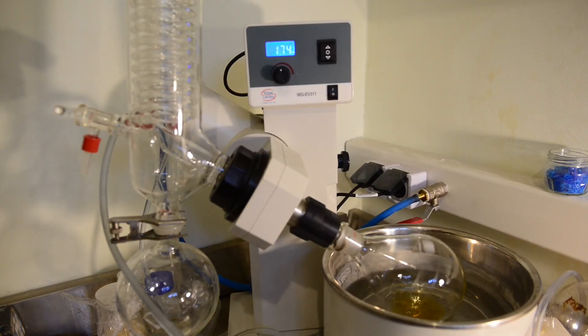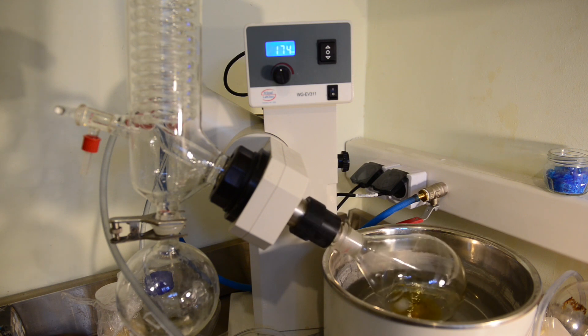Now we are starting to evaporate the chloroform from the mixture. We have decided to use a rotary evaporator. As we have filtered directly to the evaporation flask we can attach it straight to the rotovap.